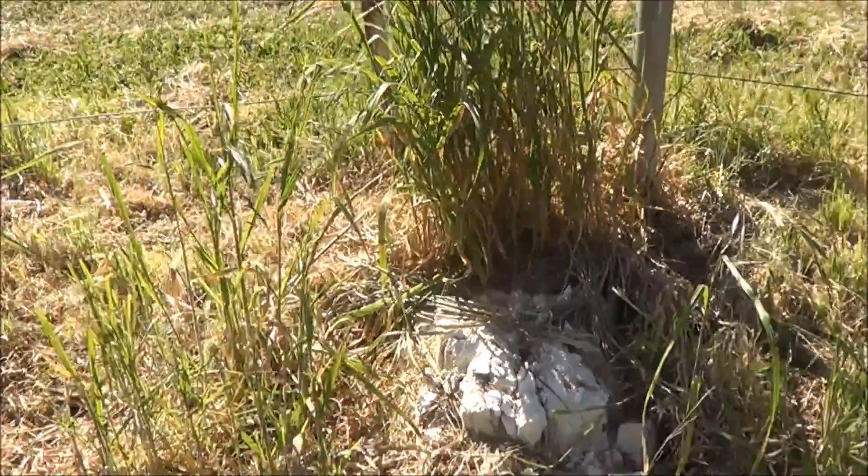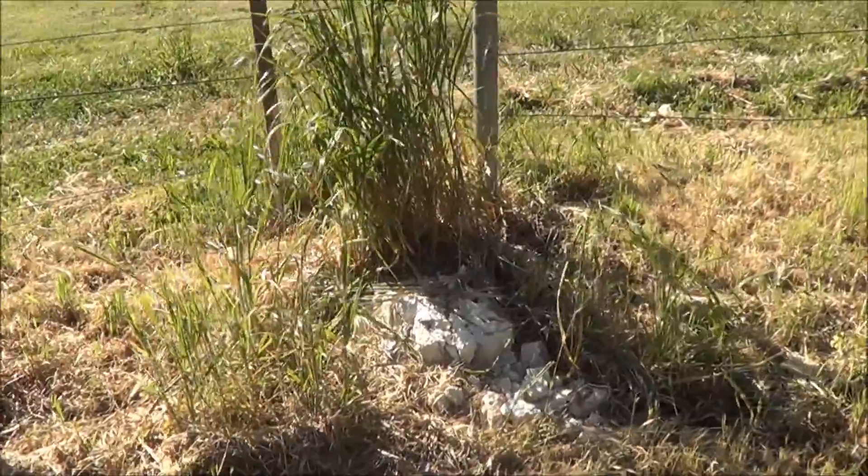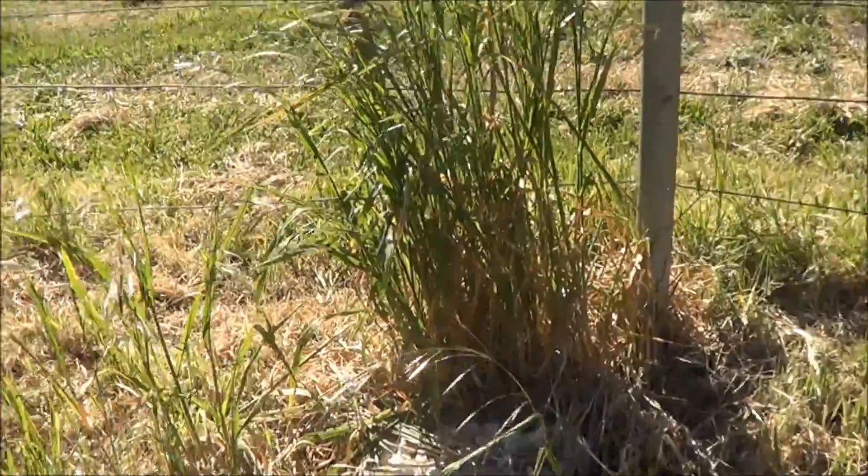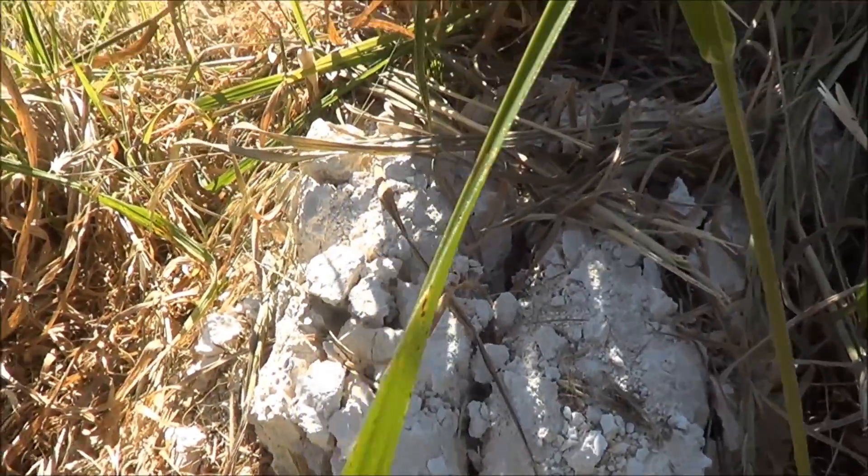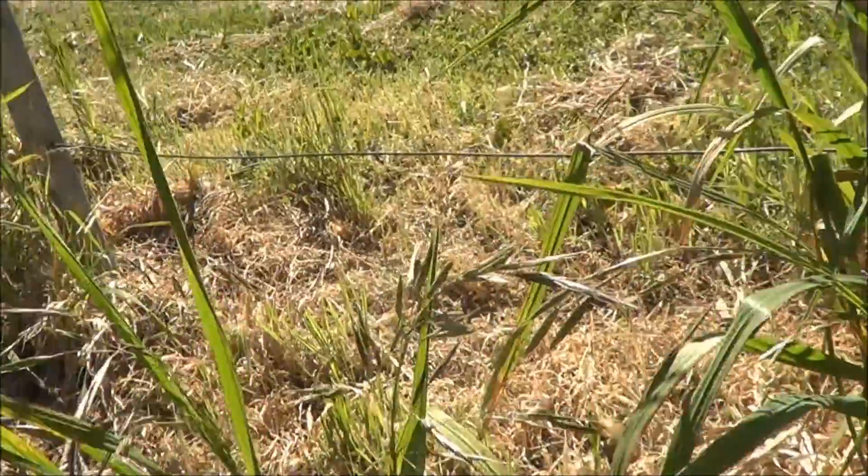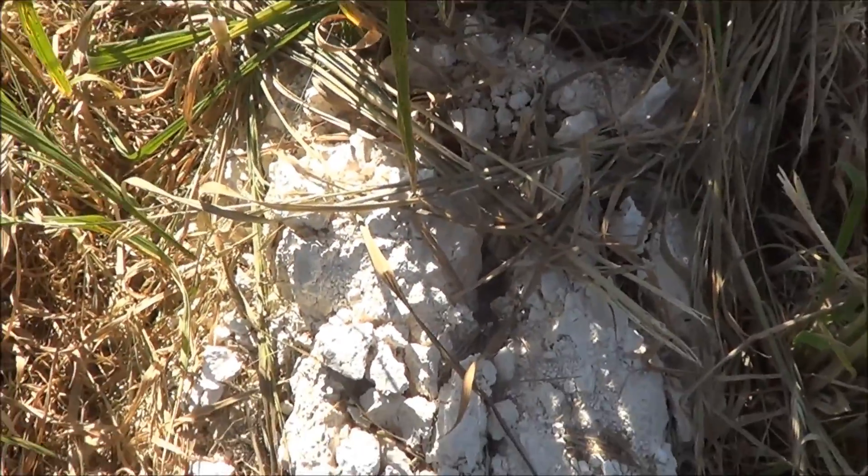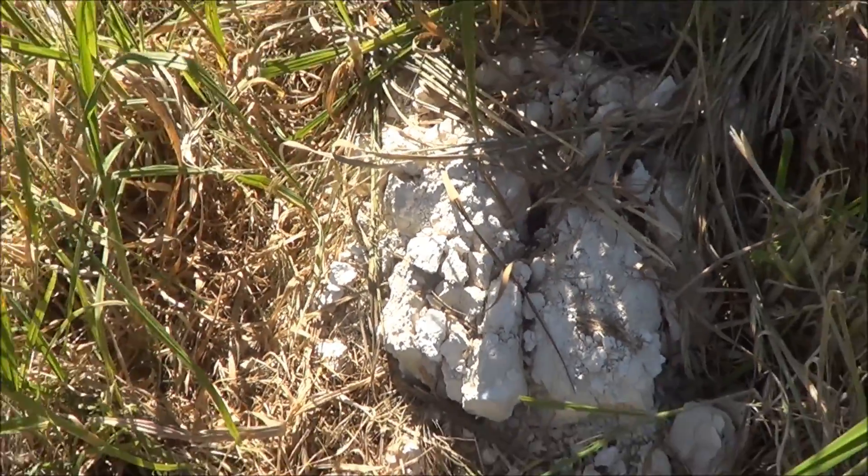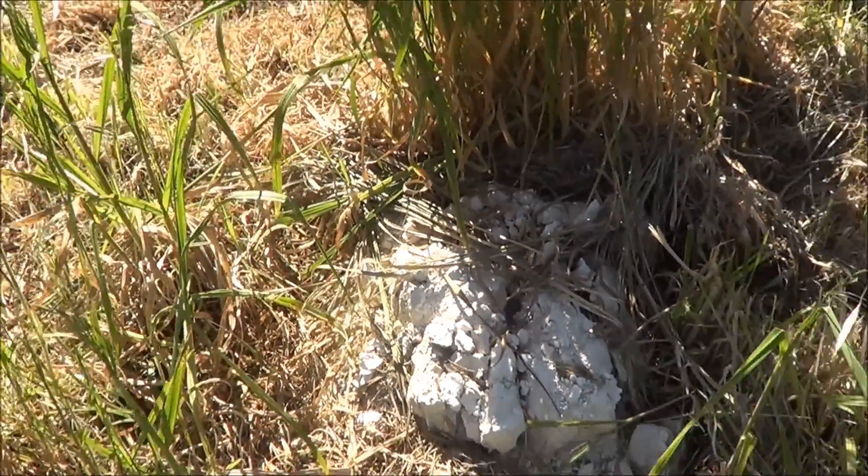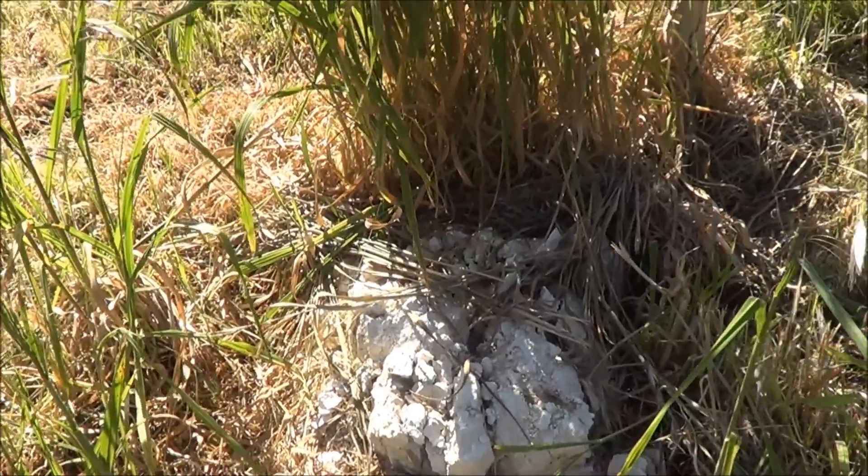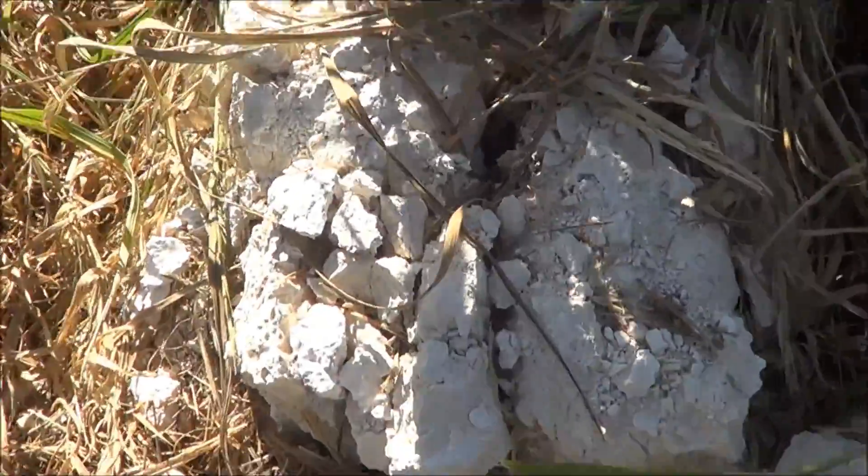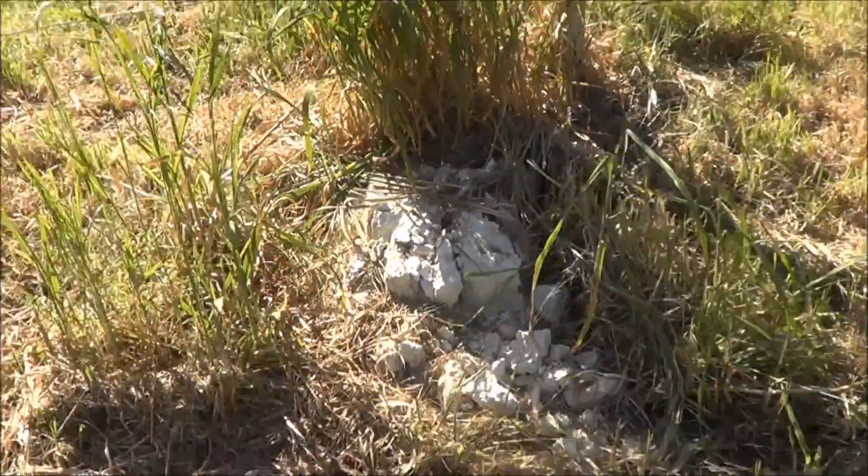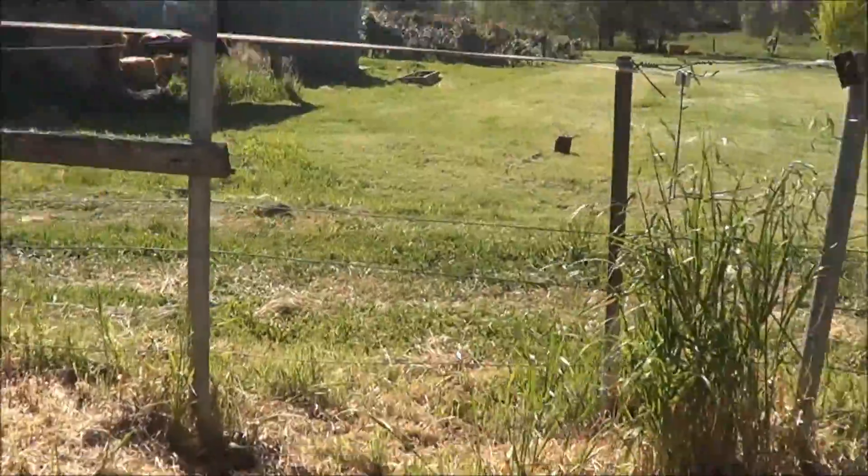It's probably been here for months to be honest, so I reckon calcium oxide reacts to form calcium carbonate over time, so this is probably all calcium carbonate or a mixture of the two. It'd be pretty easy to test this, and I'm pretty sure we can directly use calcium carbonate as opposed to calcium oxide anyway. Just have to clean off some of the ants and the leaf litter. Very strange that I find my reagents just lying in the middle of a paddock, I wish it happened more often.